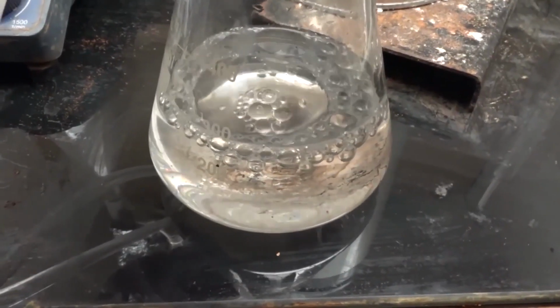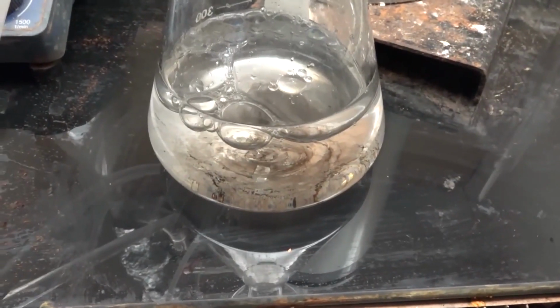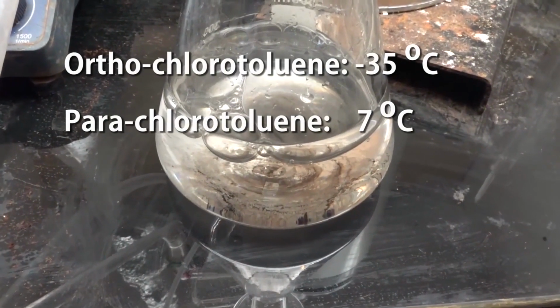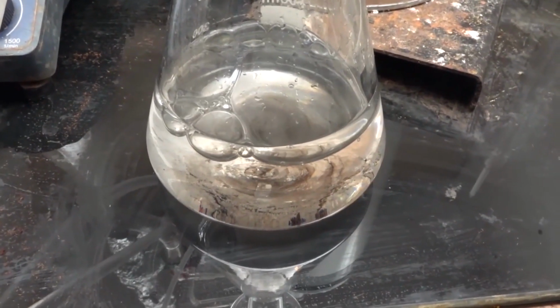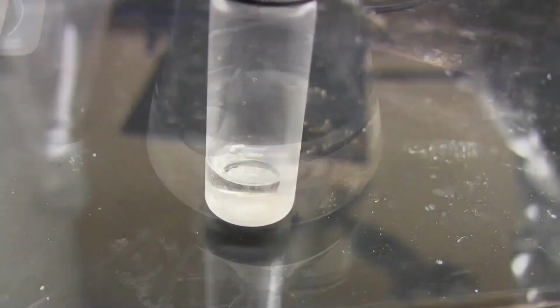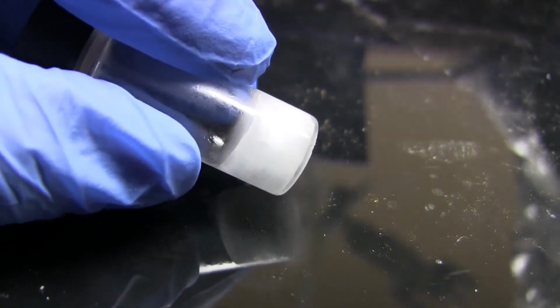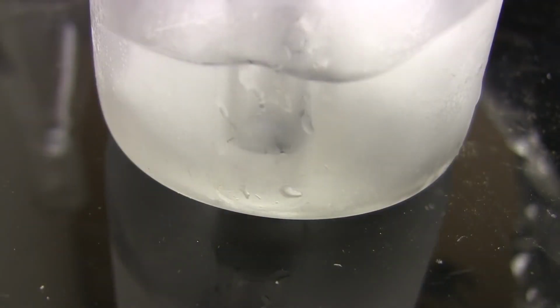Now this mixture has an unknown ratio of para and orthochlorotoluenes. We know it's been para-chlorotoluene enriched, we just don't know if it's pure. Fortunately, there is a simple test we can perform. Orthochlorotoluene has a much lower freezing point than para-chlorotoluene, so we can roughly figure out our purity based on that. Take a small sample of your chlorotoluene mixture and put it in the freezer. If it doesn't freeze at all, then it has too much orthochlorotoluene. If it freezes, then make a mixture of ice water and place the sample vial in that. If it melts again, then it's richer in para-chlorotoluene but not quite pure enough. If it stays frozen, then it's highly pure para-chlorotoluene.